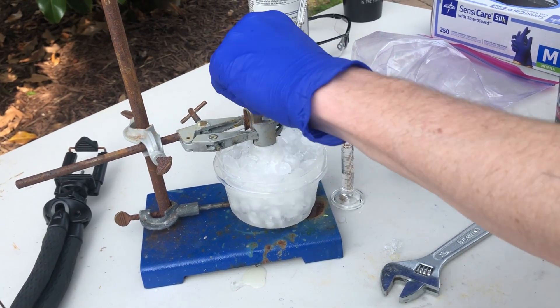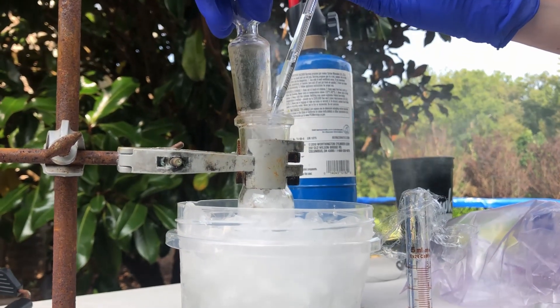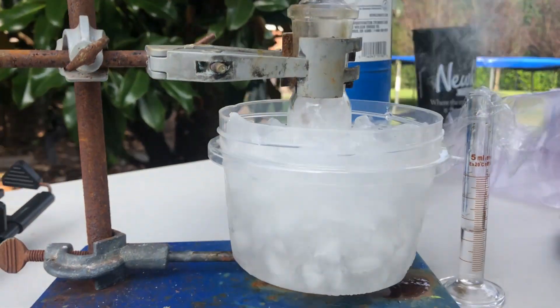I still proceed with caution because the last thing I need is sulfuric anhydride — or oleum — splashing in my face. God damn it, why do I even do this stuff?